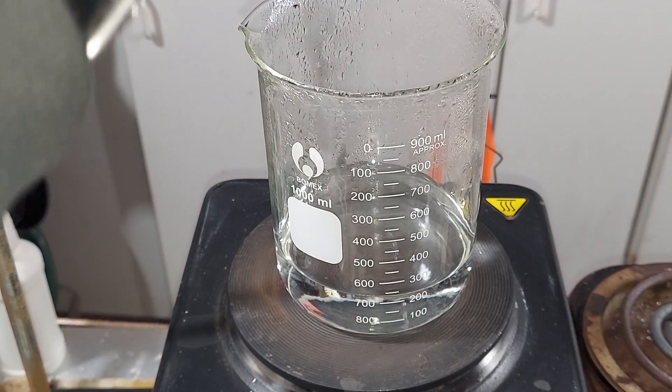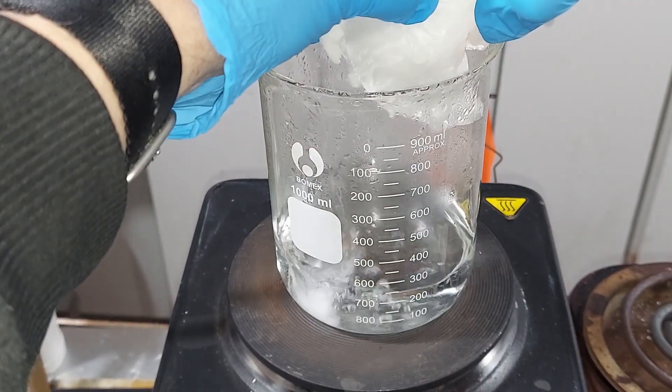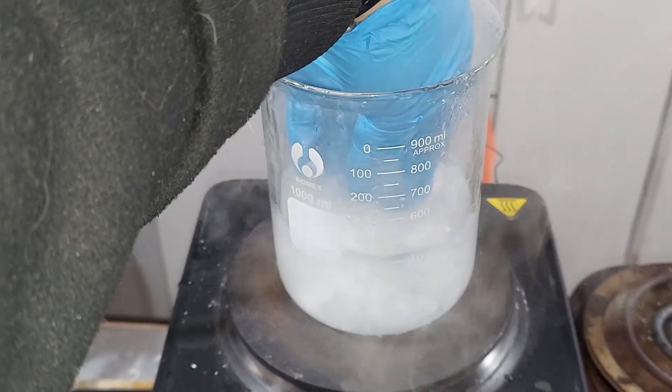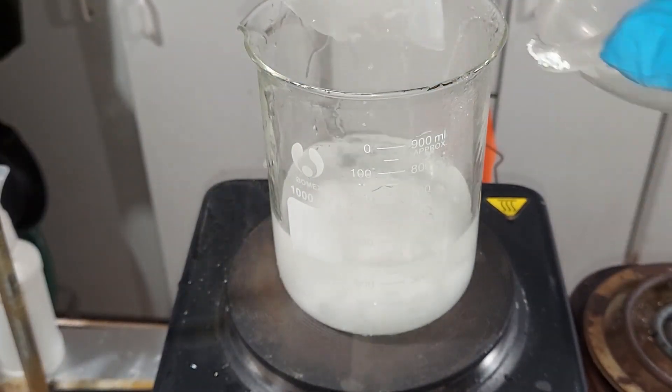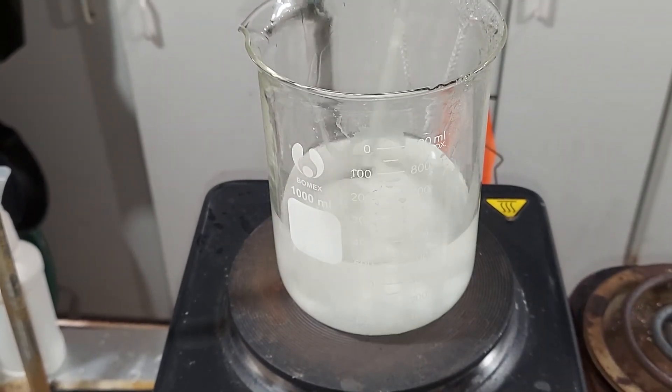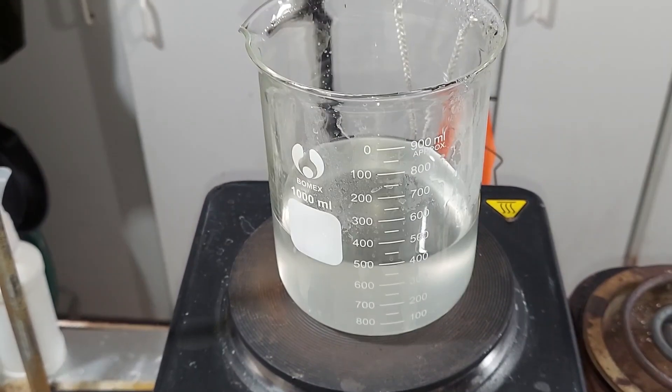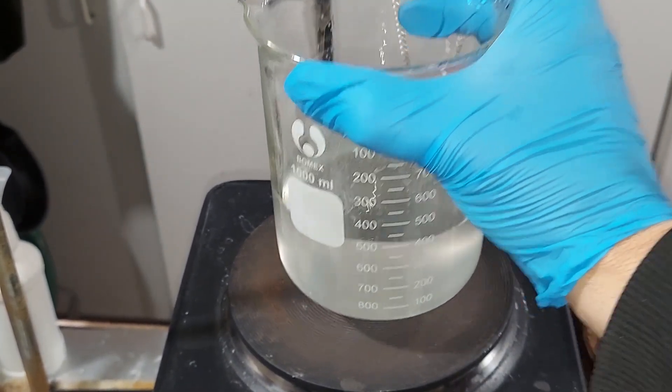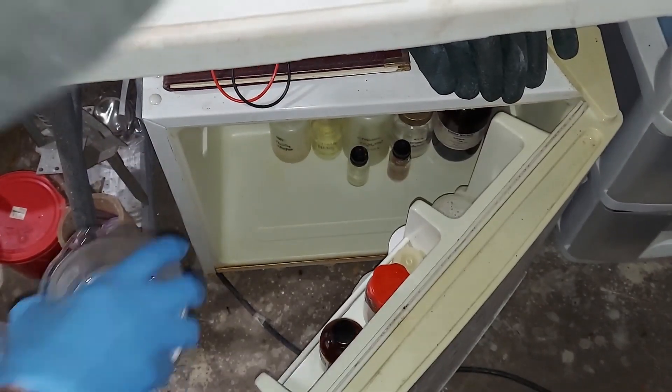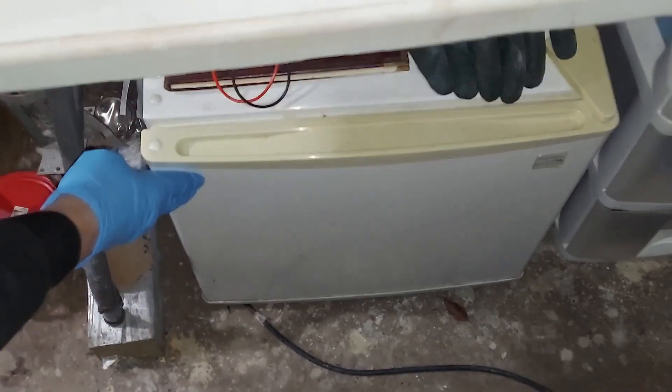But I just have over 200 milliliters of water here that just started boiling, which is fine to put our filtered solid in. Boy, this is pretty big here. Actually I'm doing it in a one liter because I want to make sure that I can certainly work with the crystals well. There you go, that's one way to do it. When this is all dissolved, of course it's gonna go right back into the chill box. Took about five minutes, it went really quick, so I'm gonna move this now into the cold.